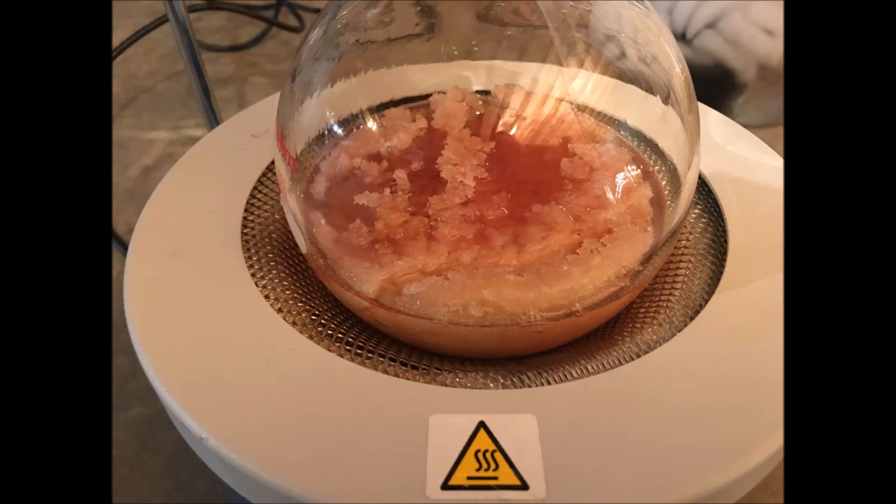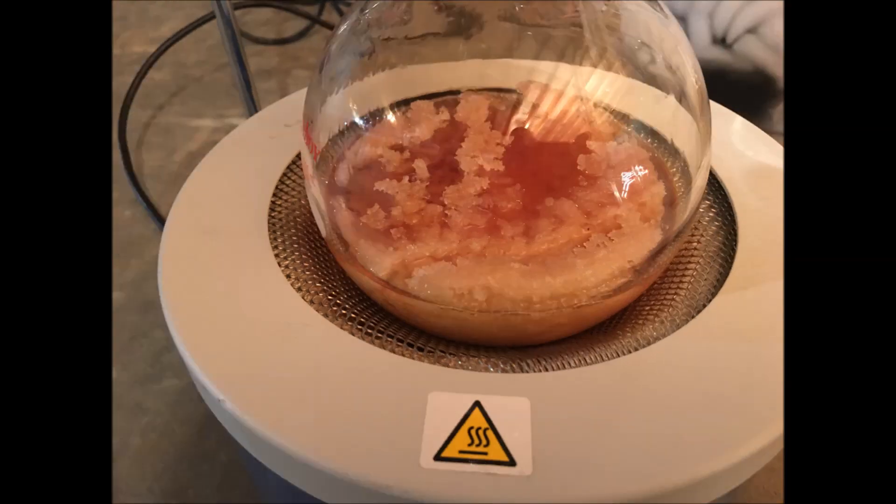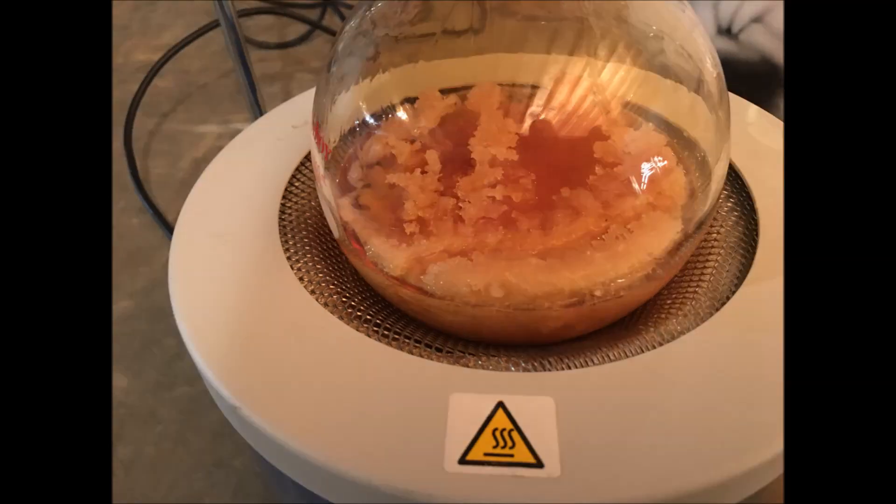I decided to take a few pictures of the flask at different times, so you can see how it progressed. At first, you will see brownish red fumes throughout the distillation apparatus. That is nitric oxides, and you don't want to breathe that in.